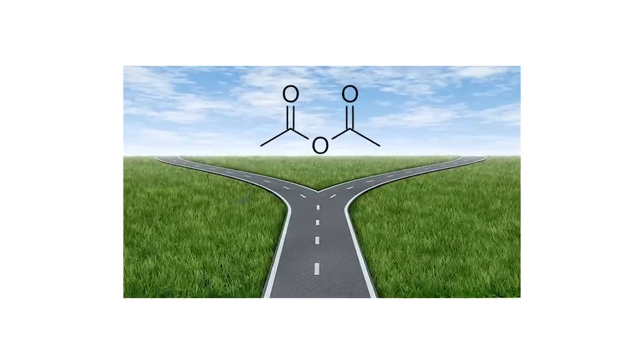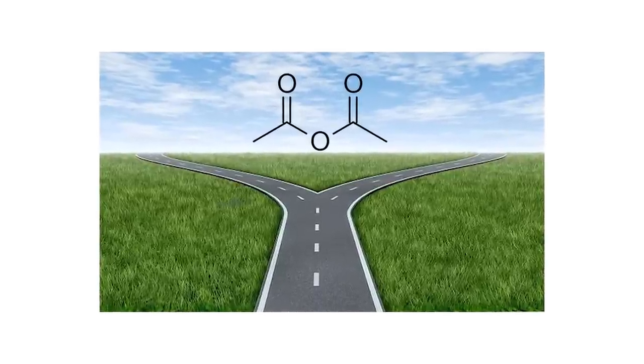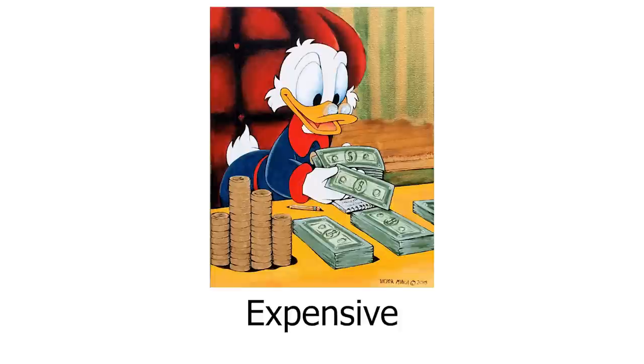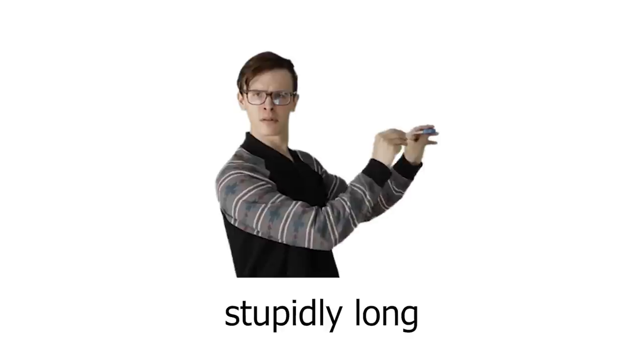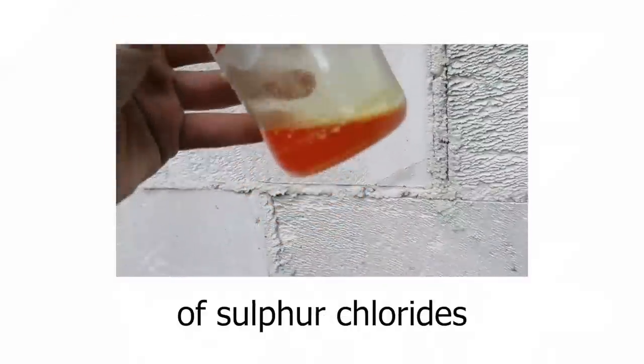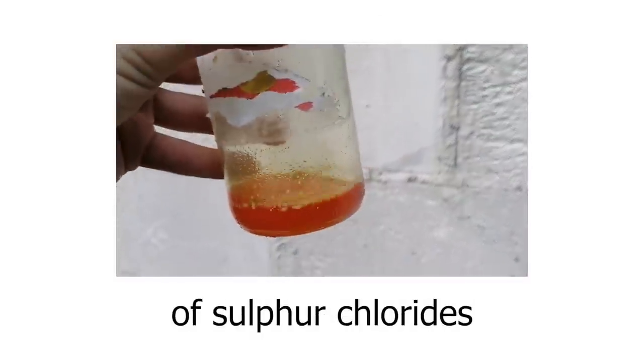Acetic Anhydride has a lot of interesting uses like plastics, perfumes and… other… FBI, open up! So there are two roads to getting the Acetic Anhydride molecule. One is expensive and easy, and the other one is extremely toxic, stupidly long, and because of the presence of sulfur chlorides, the whole process smells like shit.